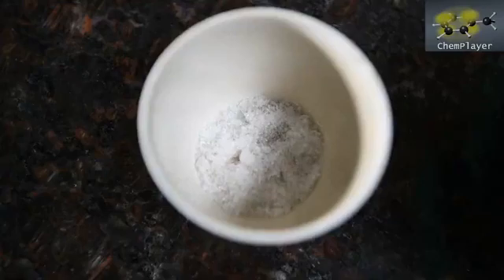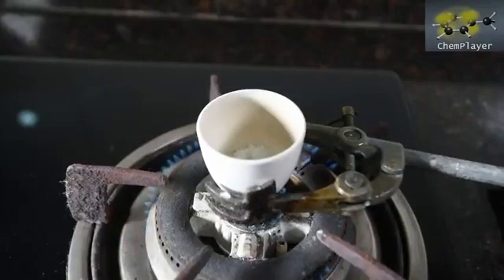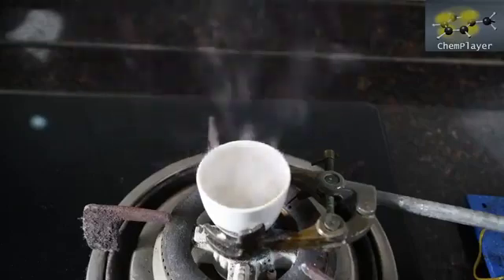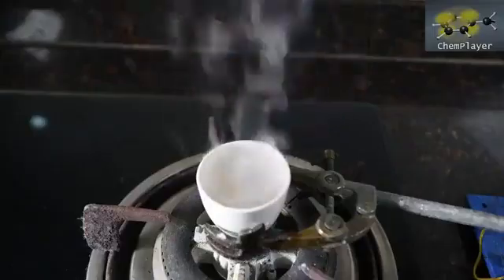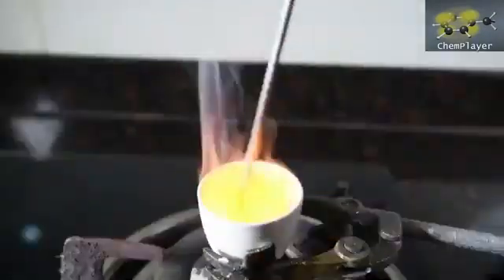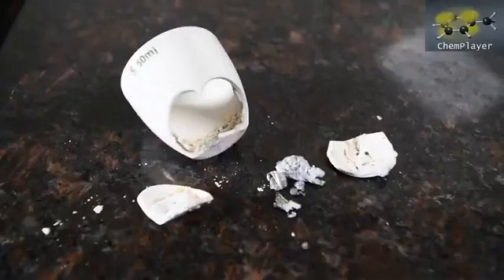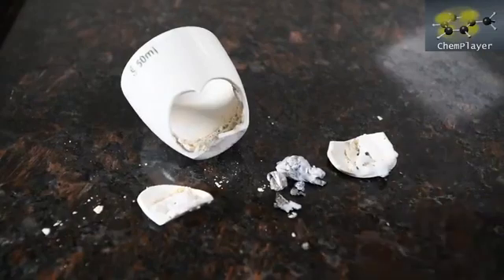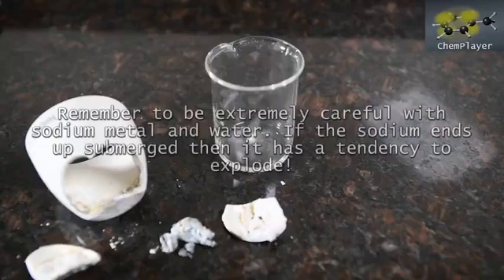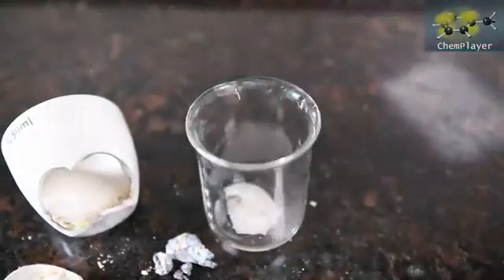Made sure that the urea covers the sodium nicely. Let's cook this and see what happens. Give it a poke — helps some sort of reaction take place. That's a bummer. Poking it also killed the crucible with the heat of the reaction. We'll carefully add water to the residue now and see if we can dissolve it. There's still some sodium metal in there and overall it looks as though a lot of the urea decomposed before it had a chance to react.